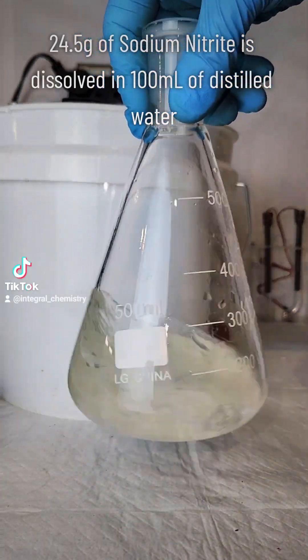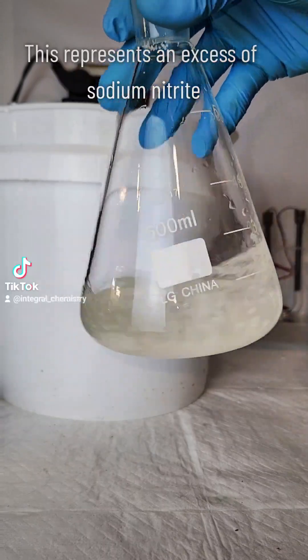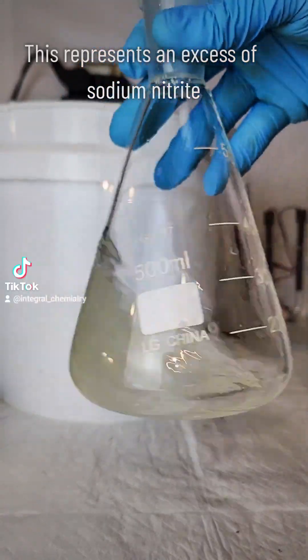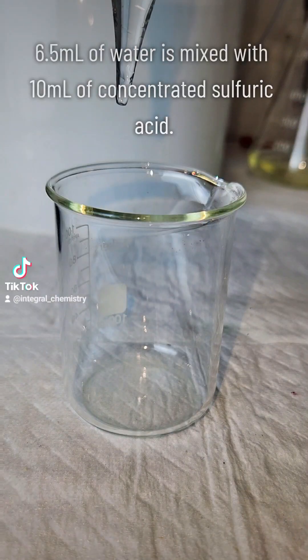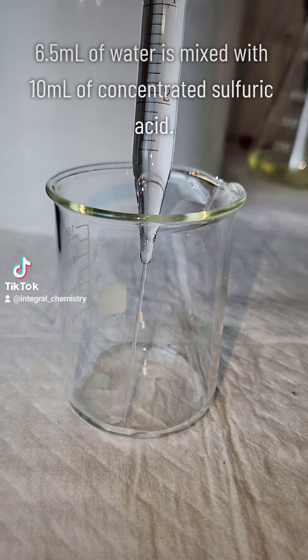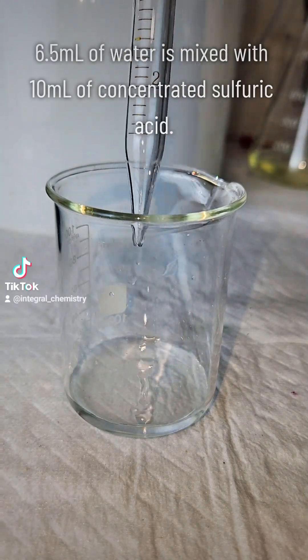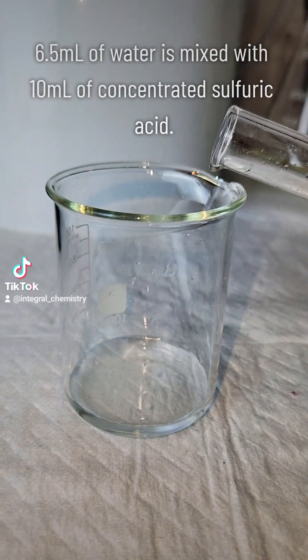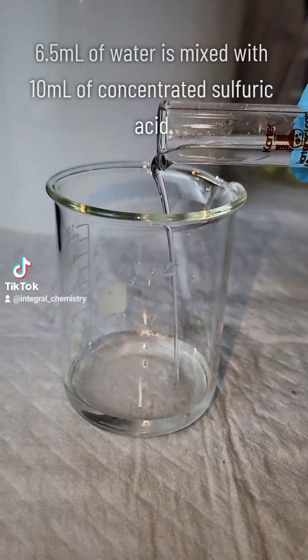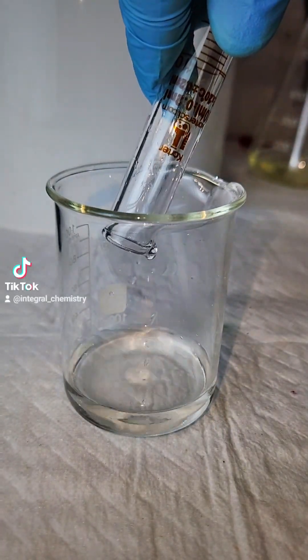To begin this synthesis, I start by dissolving 24.5 grams of sodium nitrite in 100 milliliters of distilled water. In a separate vessel, I dilute 10 milliliters of concentrated sulfuric acid with 6.5 milliliters of distilled water.